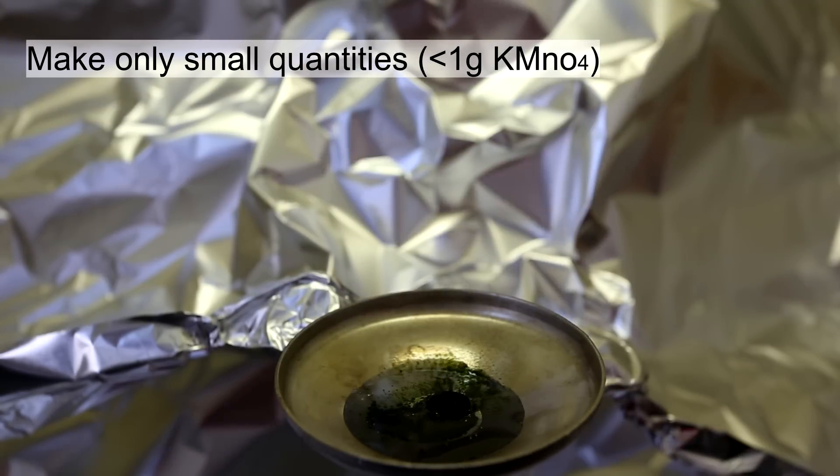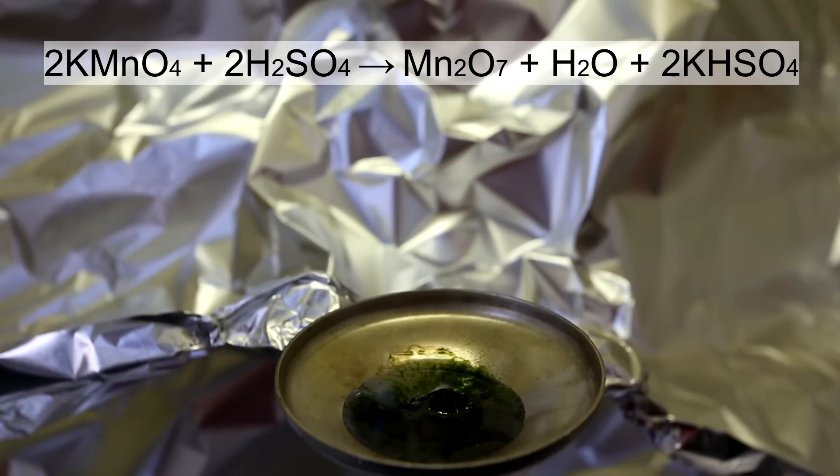Then, lightly stir the mixture to make sure that all of the potassium permanganate reacts. The manganese heptoxide is formed according to the equation above.